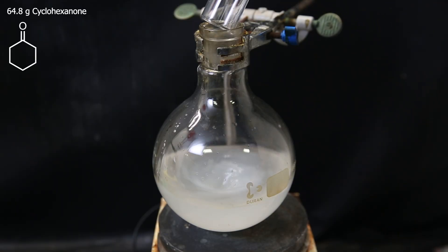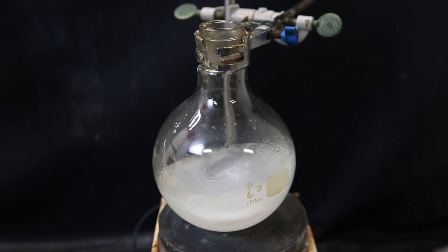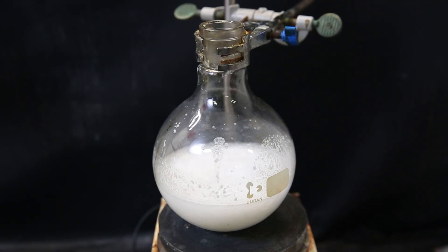The mixture immediately becomes cloudy, because it's a bit oily, and the reaction proceeds quickly. A small bit of white solid precipitates, and then the product suddenly all crashes out at once, and the stir bar can no longer handle it.